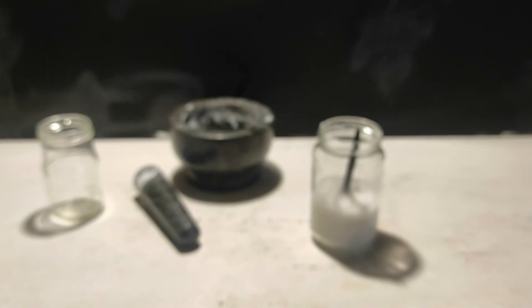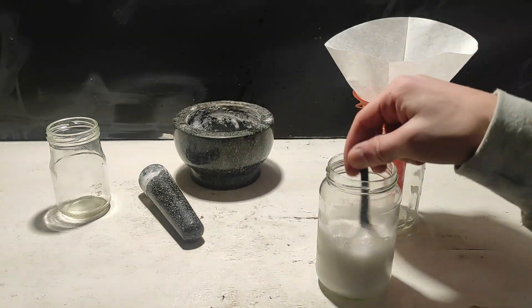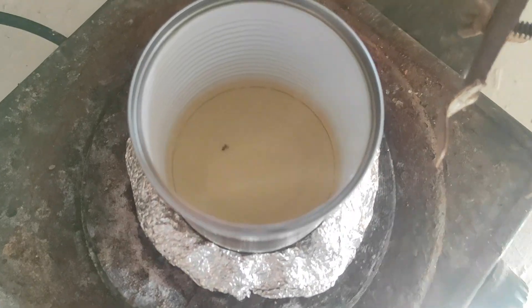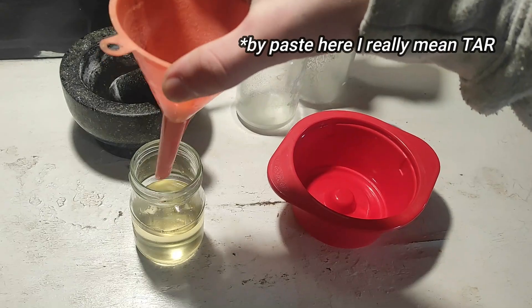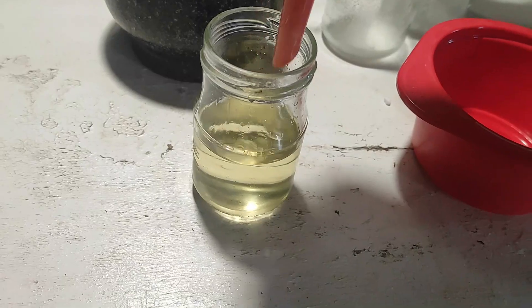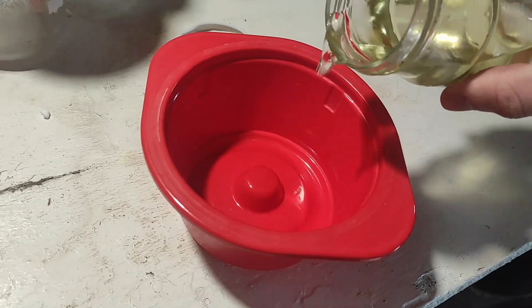Basically, the solvent is going to dissolve the product but not the other components like starch. After filtering, I'm just going to evaporate the solution to hopefully give us some pure acetyl salicylic acid. Spoiler — it didn't work. I just got some weird paste that was so contaminated I did not want to use it for the next step. So what I did instead is use some old salicylic acid from the phenol video. The contamination is probably linked to my isopropanol being yellow.